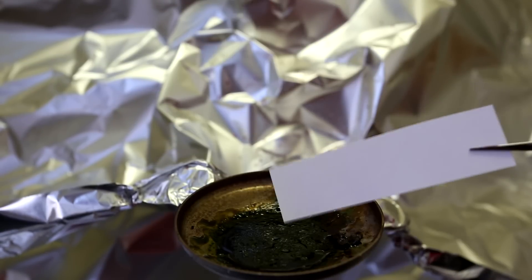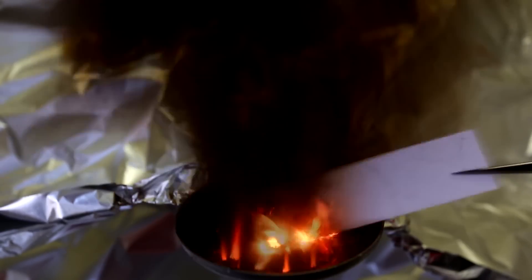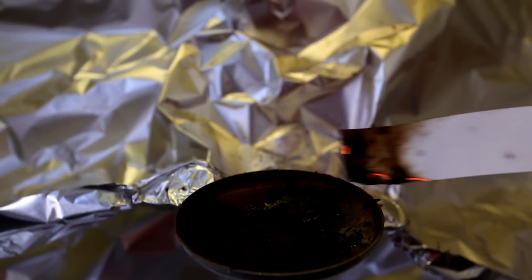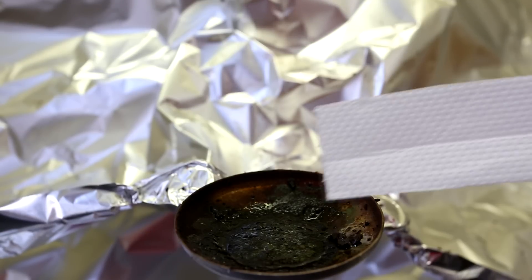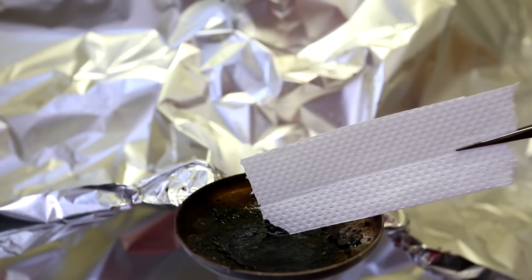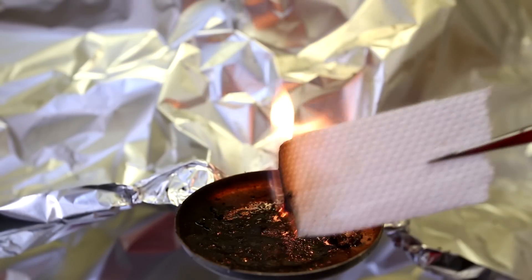In the higher concentrations, the manganese heptoxide quickly and violently oxidizes the paper. Again, tried with paper towel, there is a quick pop and the paper immediately bursts into flames.